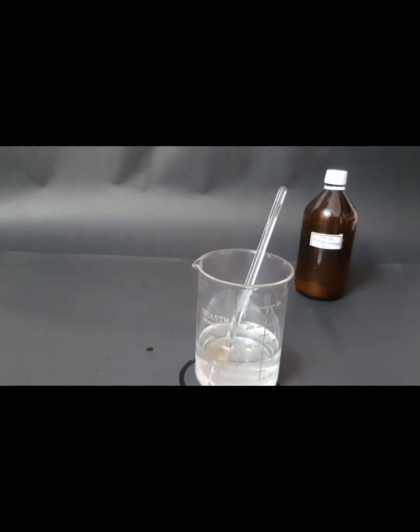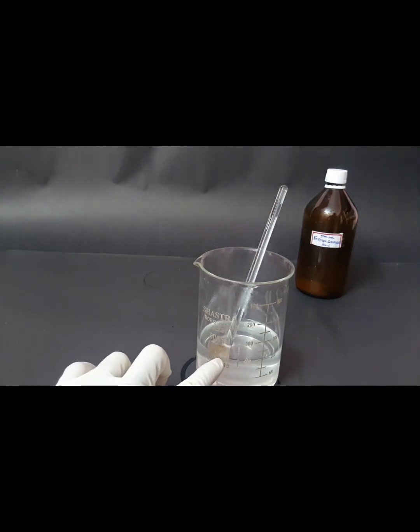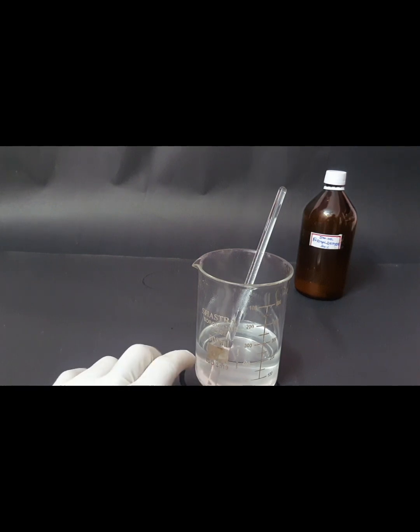So what we're going to do is boil this mixture until the water evaporates out, and hopefully we can find some crystallization taking place, and we will be transferring this to a heat source where the rest of the water can be evaporated, and hopefully we can get some pure hexamine.